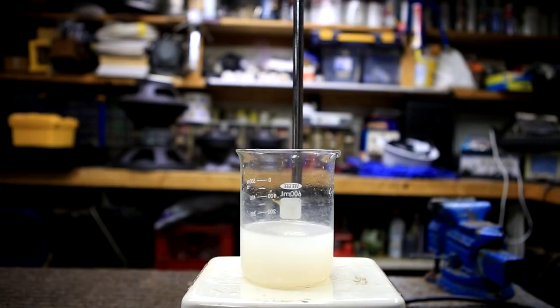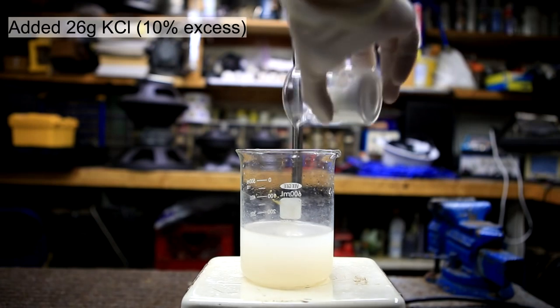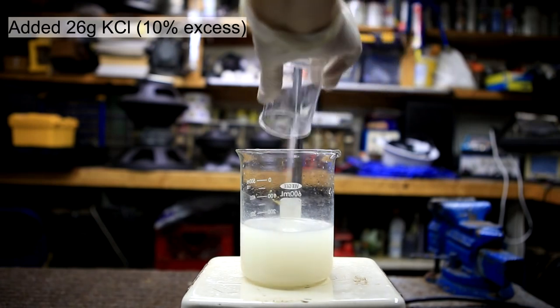After the solution is filtered heat it up to about 80 to 90 degrees Celsius. To the hot solution 26 grams of potassium chloride was added.